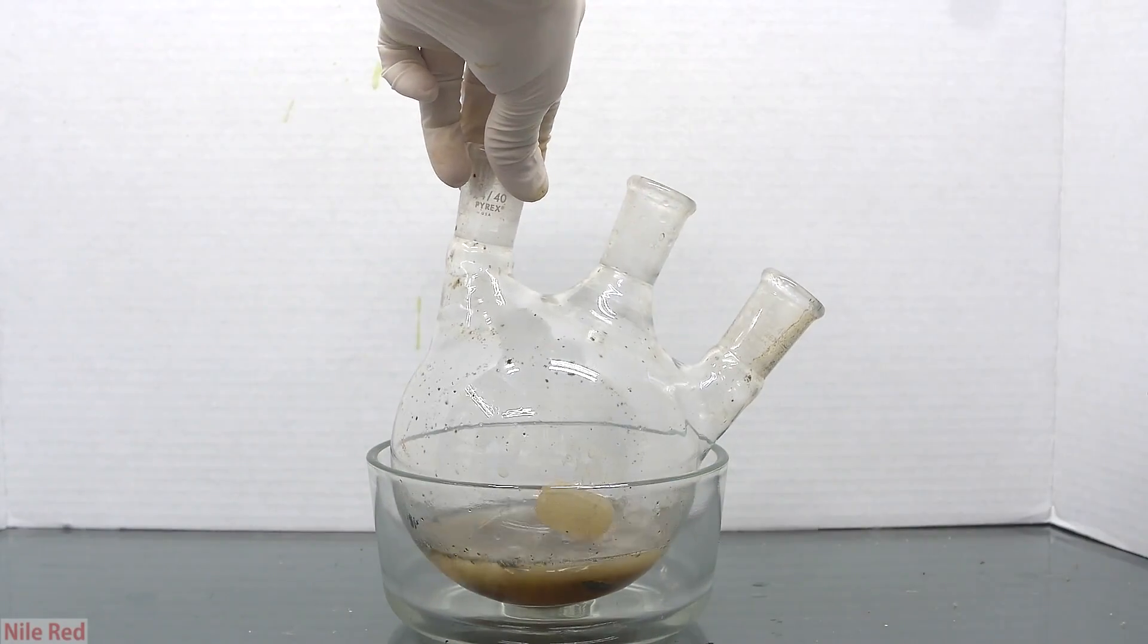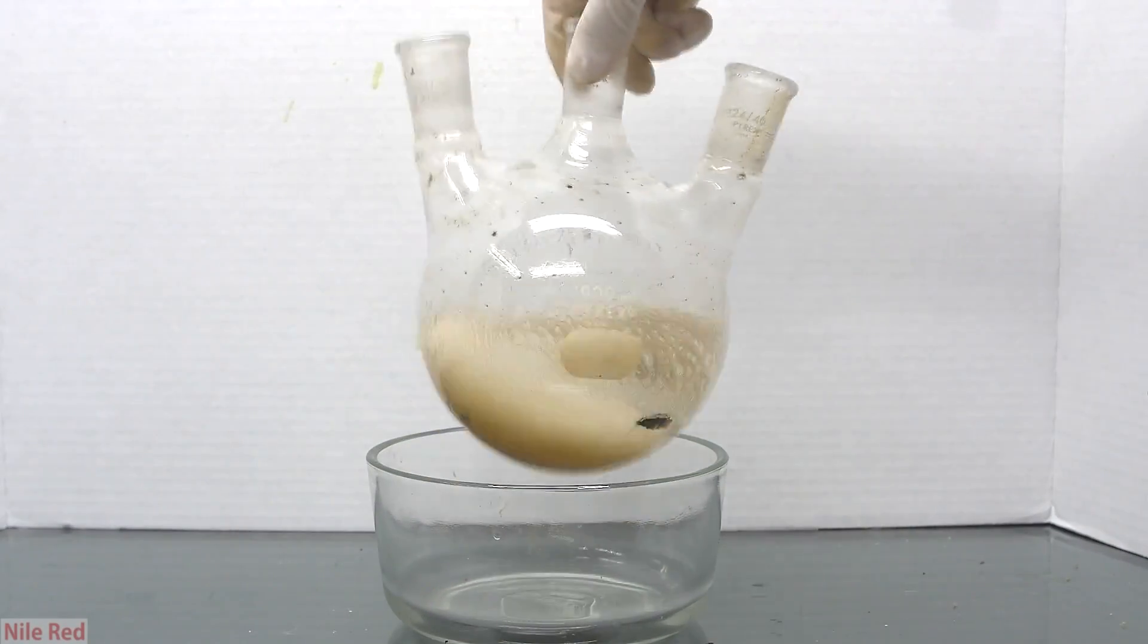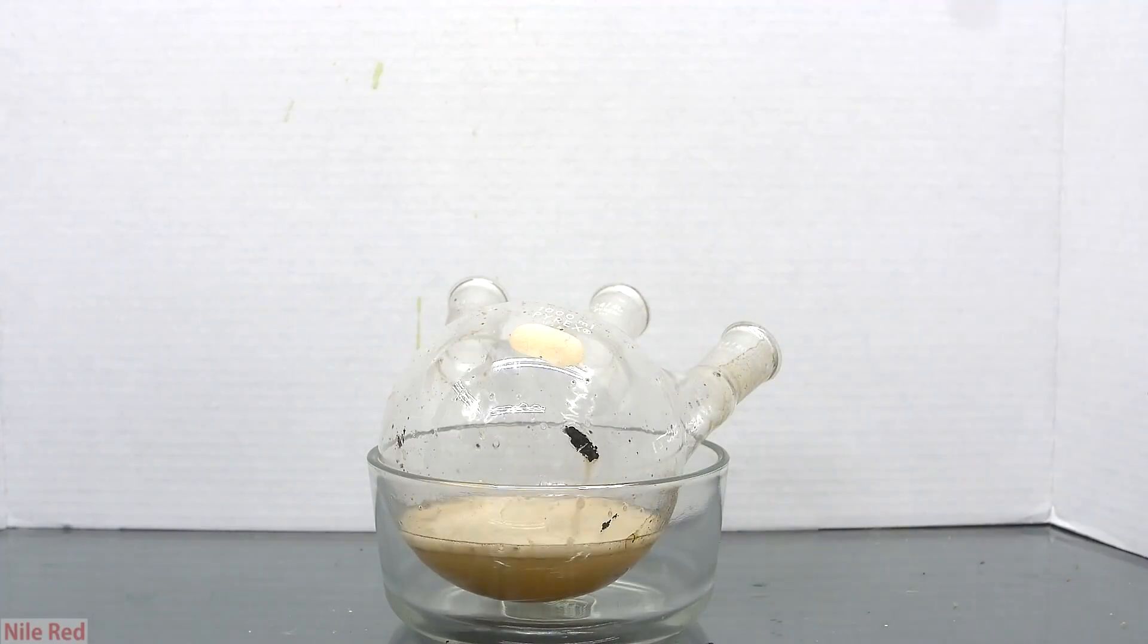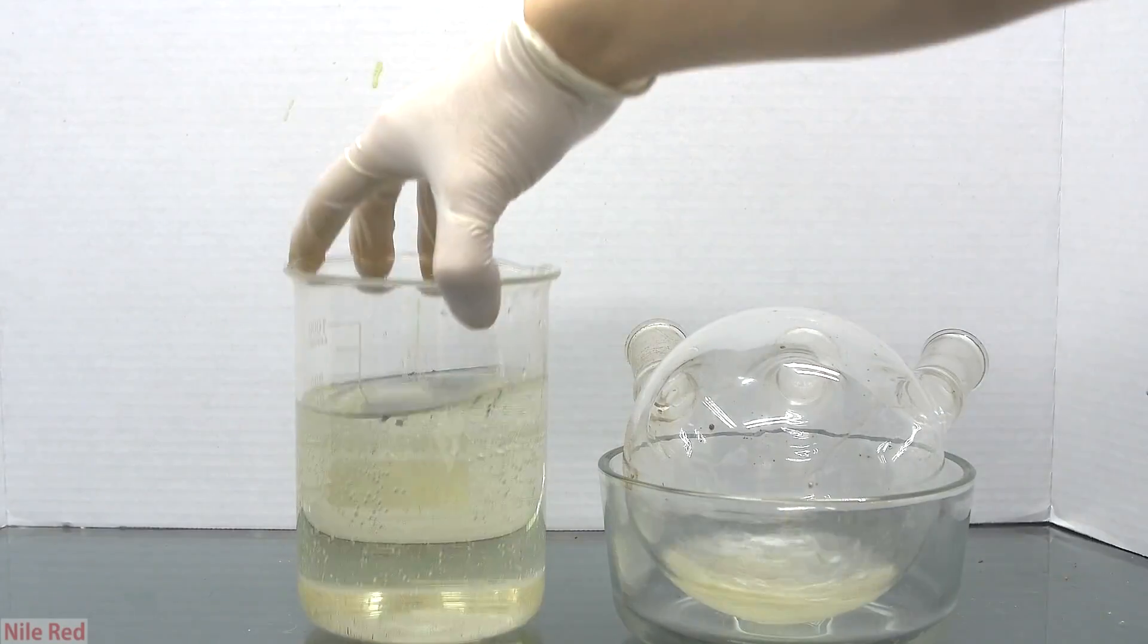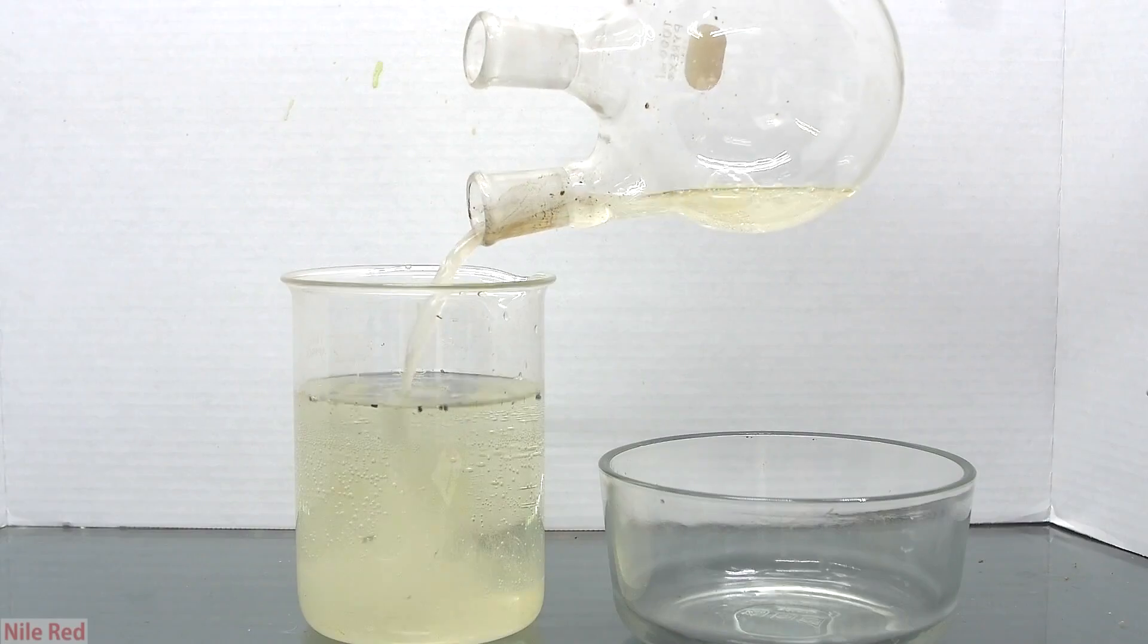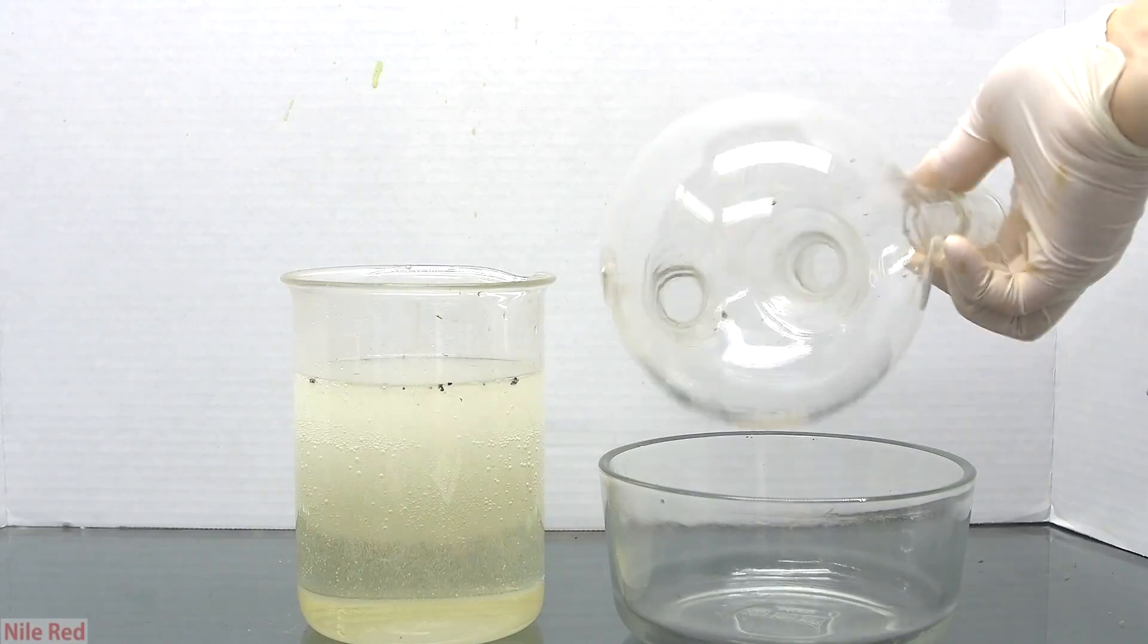Eventually though, it seemed like the piranha was losing its potency, so I made a new fresh batch just to get rid of the last stubborn stuff. In the end, when I was finally done cleaning it with the piranha, I was left with a relatively clean flask.